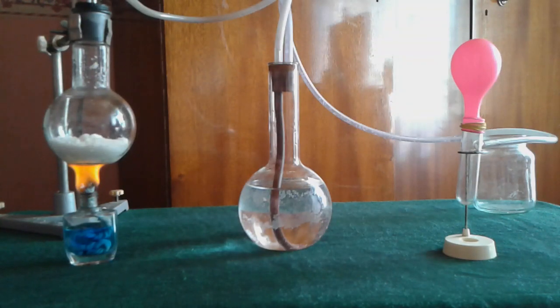Hello, I am the mad chemist and this is my very first video in which I explain how to synthesize nitrous oxide, also known as dinitrogen monoxide or laughing gas.